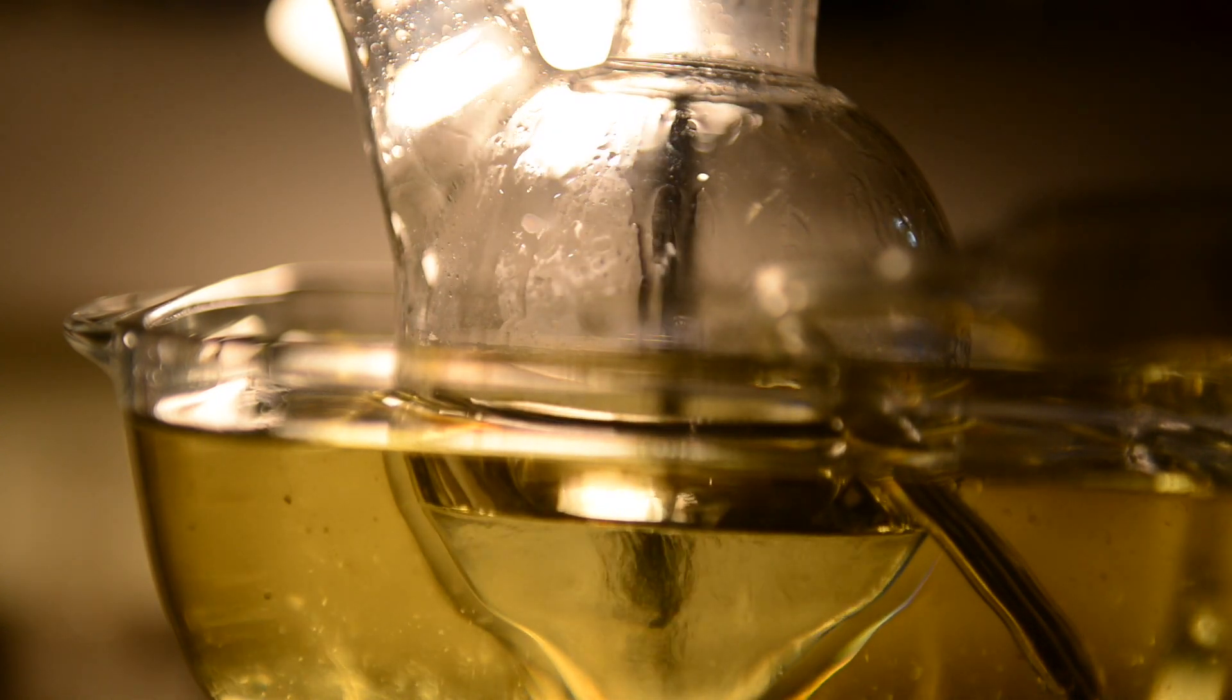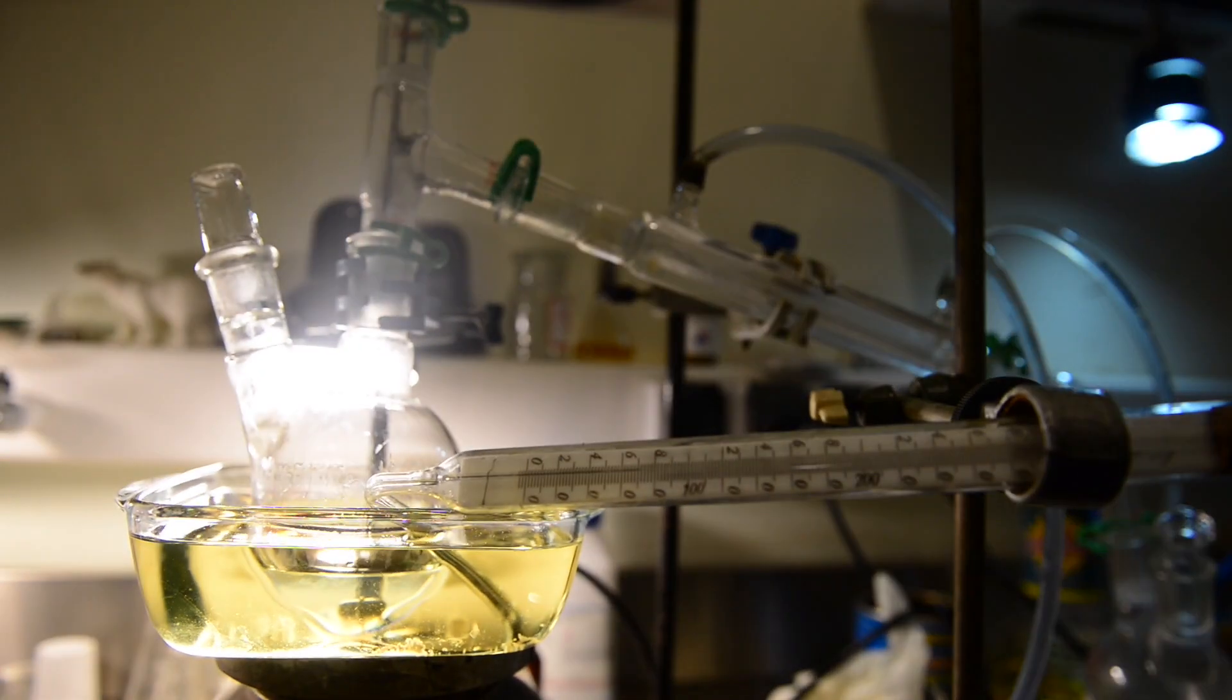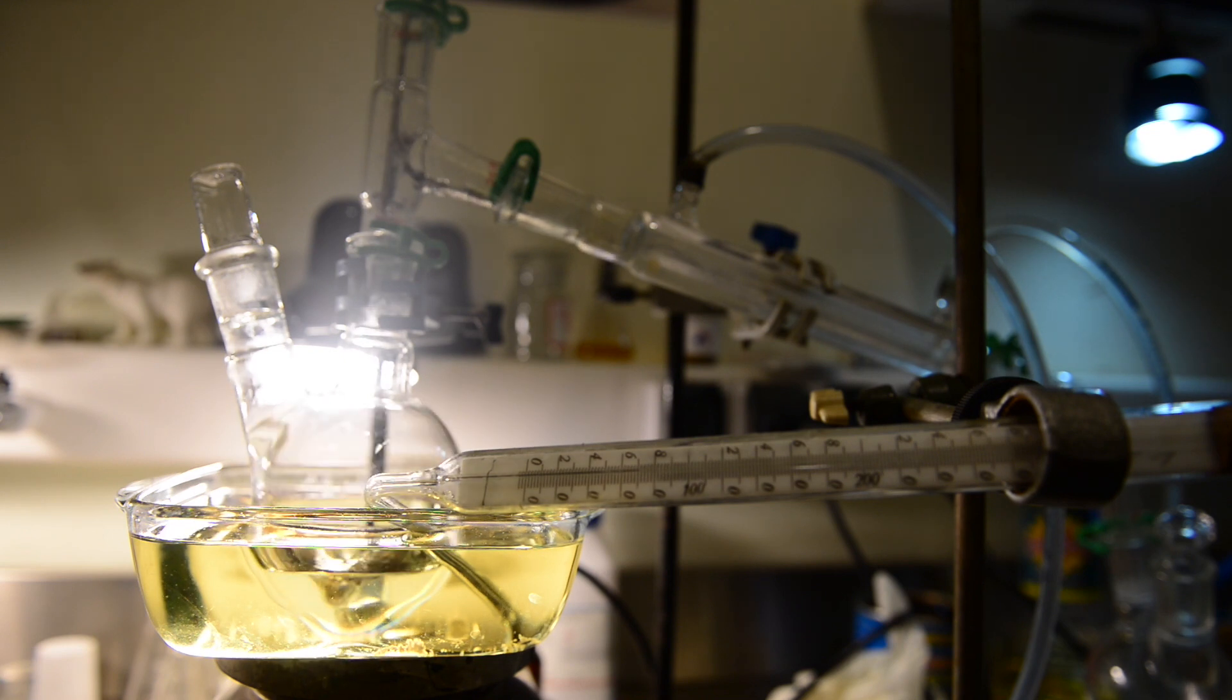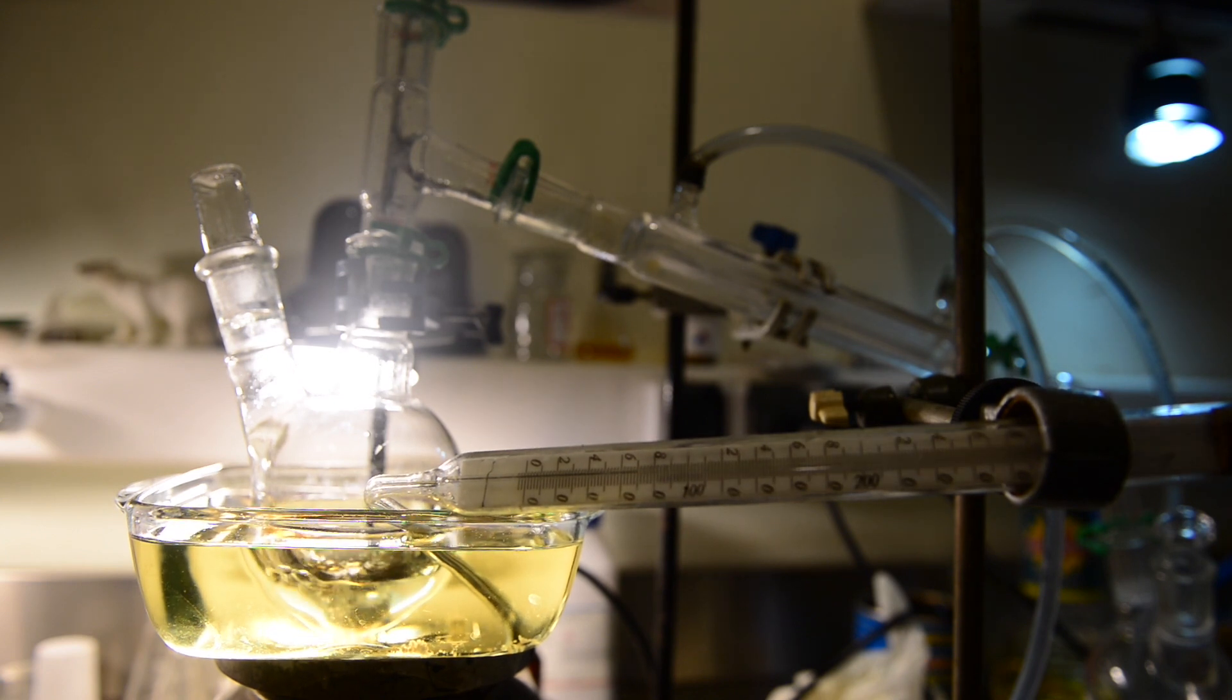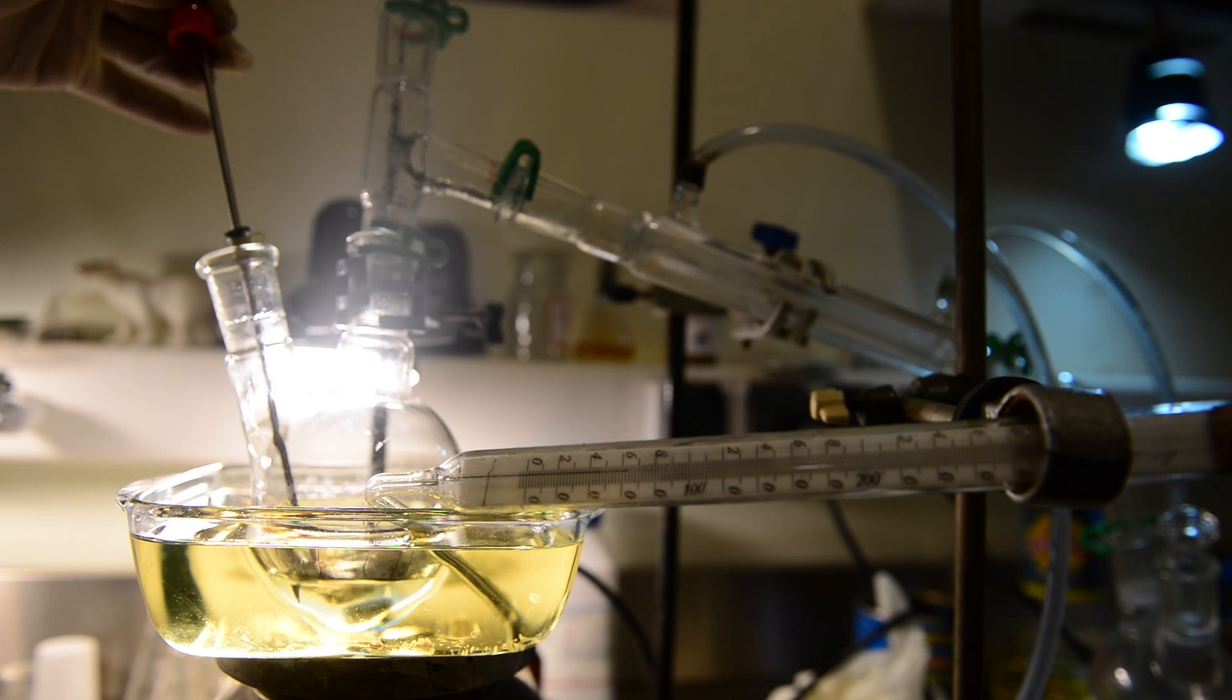To ease the evaporation process we are going to add the small stir bar. We have temporarily switched the vacuum off. After placing the stir bar and switching the vacuum on, a violent bumping occurred and most of the solvent has gone. We continued the so-called distillation for a few more minutes. I have a strong feeling that we lost some part of the product as well.